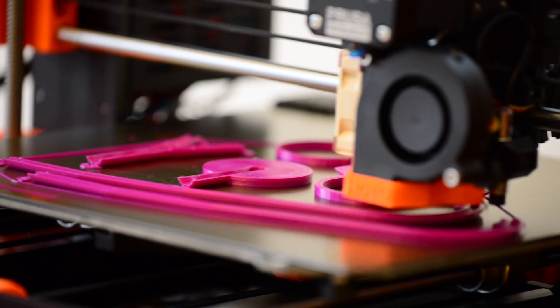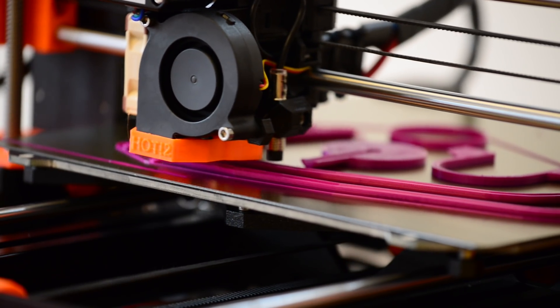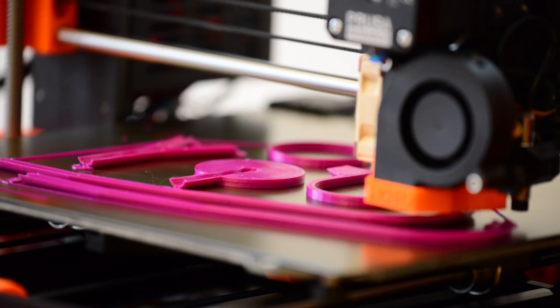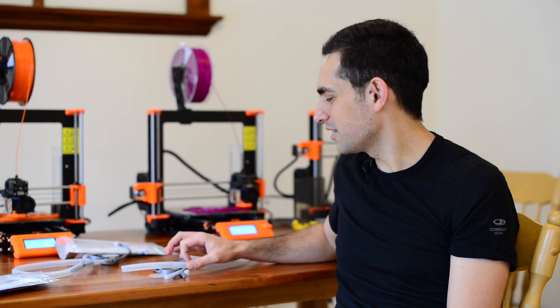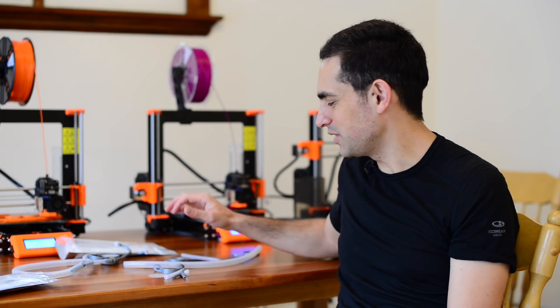So after that, I thought there has to be a better way to deal with this — a way to reduce the cost and maintain the quality. This is the stethoscope that our team worked on engineering, and basically it consists of three main parts.